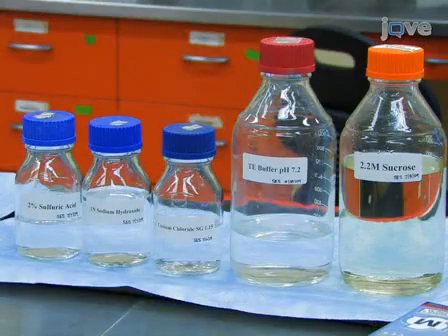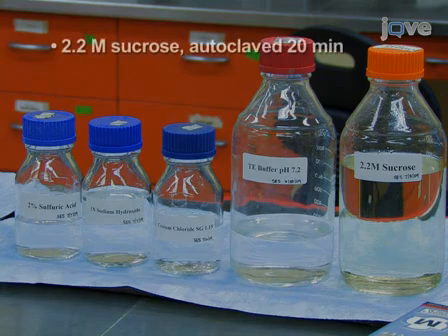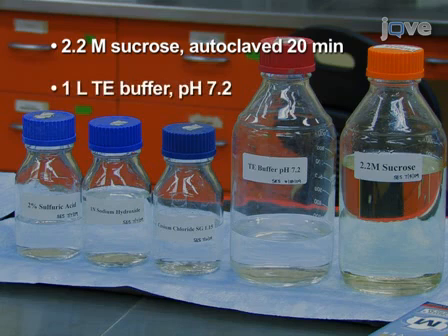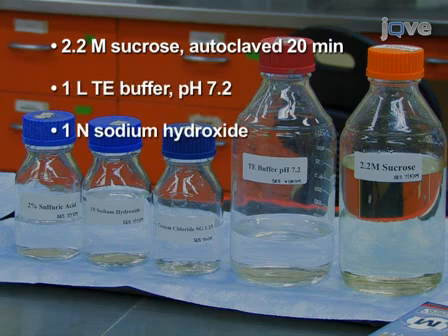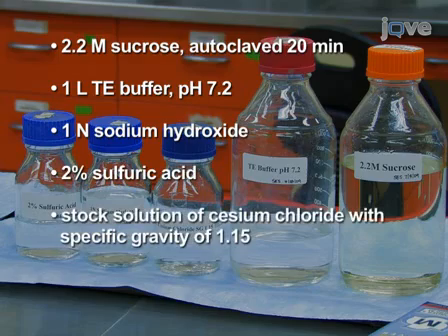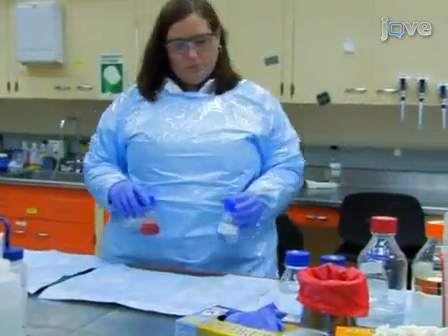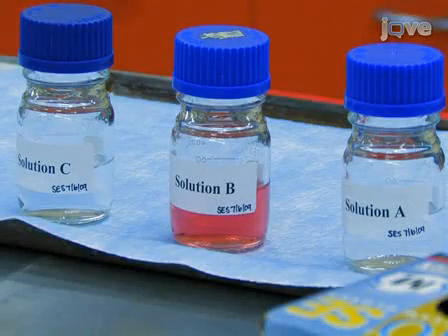Prior to T. gondii oocyst collection, one must first prepare all of the necessary solutions for the sucrose float and cesium chloride gradient centrifugation steps. The solutions that you will need include a 2.2 molar solution of sucrose sterilized by a 20-minute cycle in the autoclave, 1 liter of TE buffer pH 7.2, a 1 normal solution of sodium hydroxide, a 2% solution of sulfuric acid, and a stock solution of cesium chloride with a specific gravity of 1.15. The 1.15 cesium chloride stock solution will be used to make solutions A, B, and C, which will be used to prepare the cesium chloride gradient.